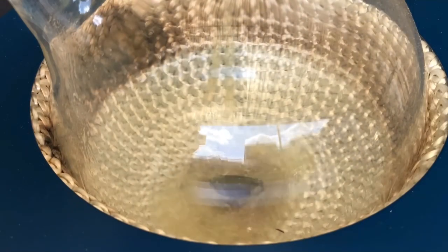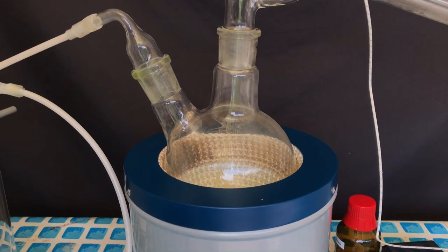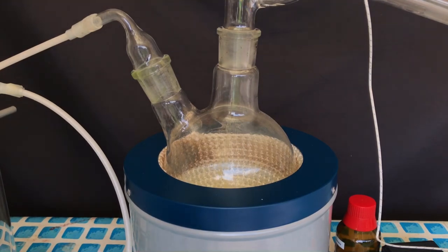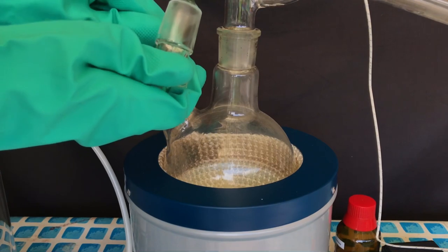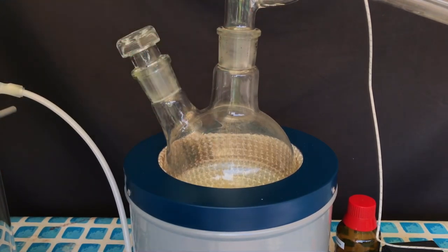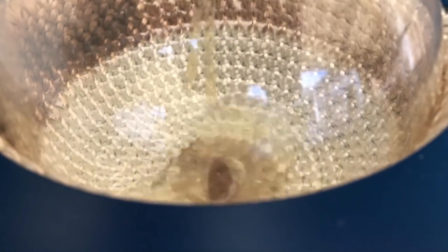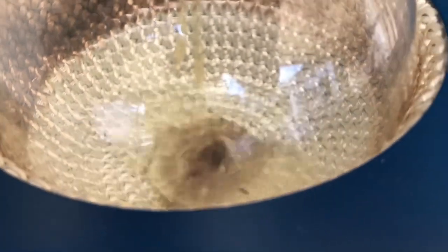Because everything turned liquid, it seemed like we used enough sulfur dioxide. The next step is going to be a simple distillation. Before we can begin, however, we have to switch out the hose connector for a glass stopper. Small amounts of liquid when stirred always make these fascinating patterns.